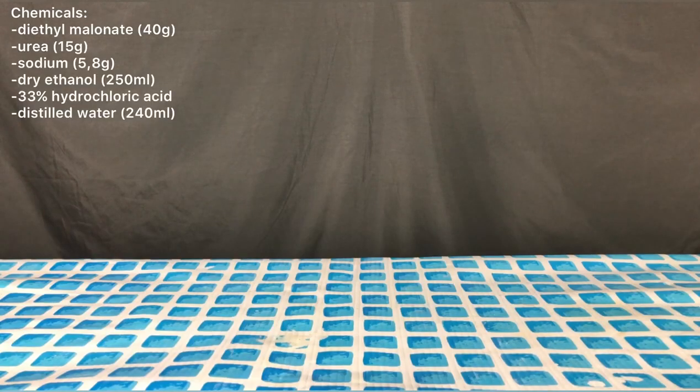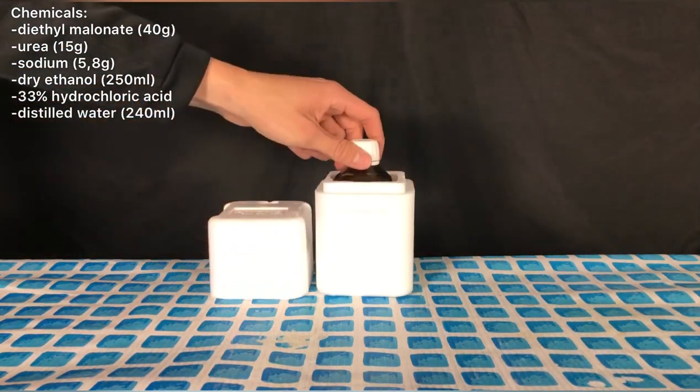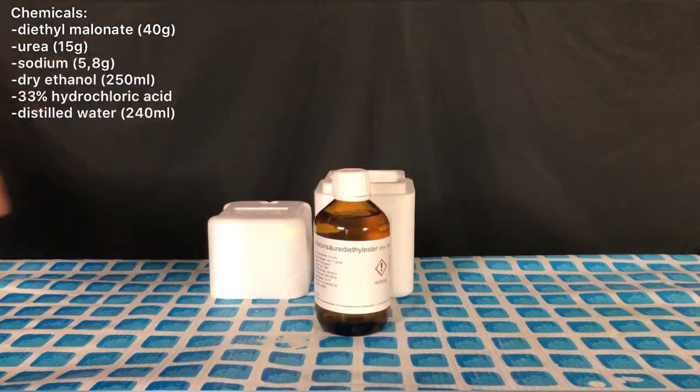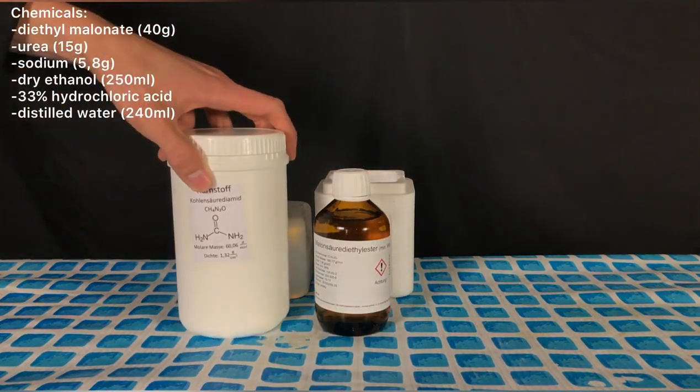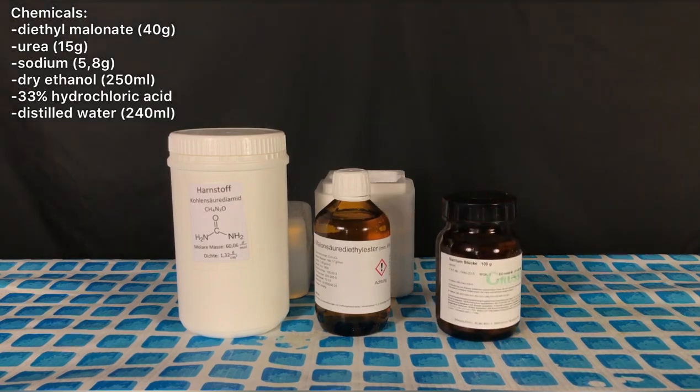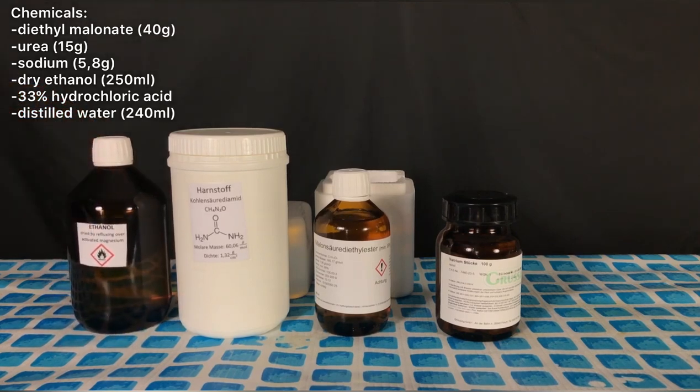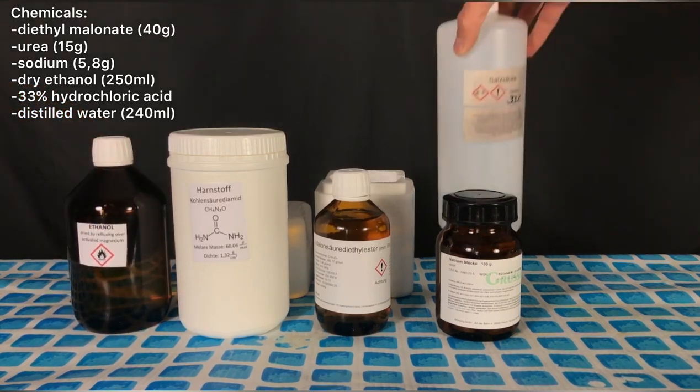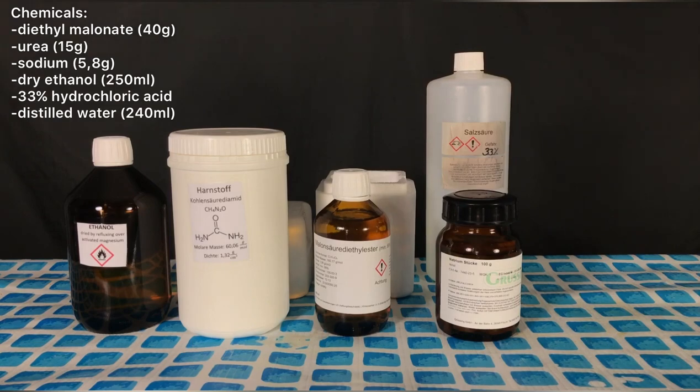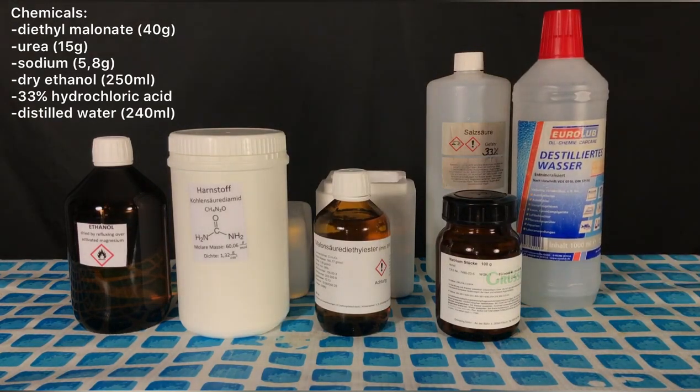For this project you will need 40 grams of diethyl malonate, 15 grams of urea, 5.75 grams of sodium (we used 5.8 grams), 250 milliliters of dry ethanol, 33% hydrochloric acid, and lastly 240 milliliters of distilled water.